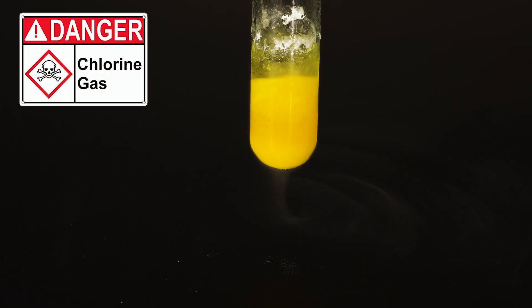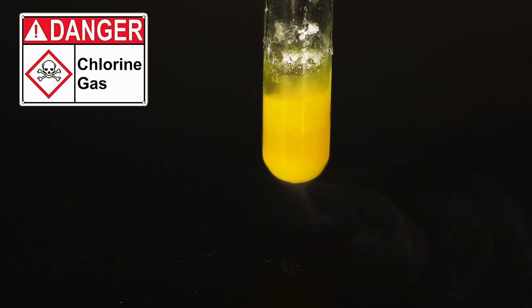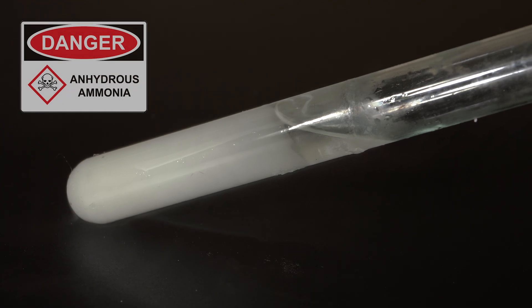Hey guys! In this short video I'll show you what happens when liquid chlorine contacts liquid ammonia.